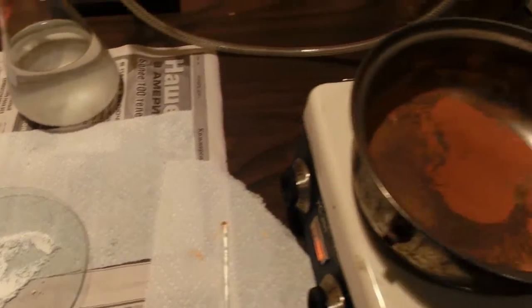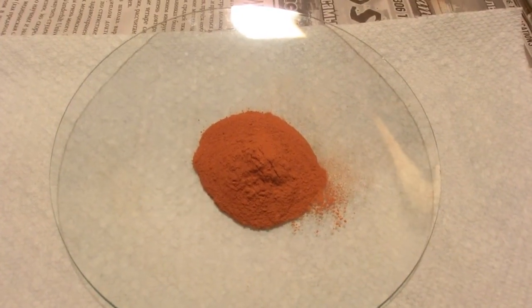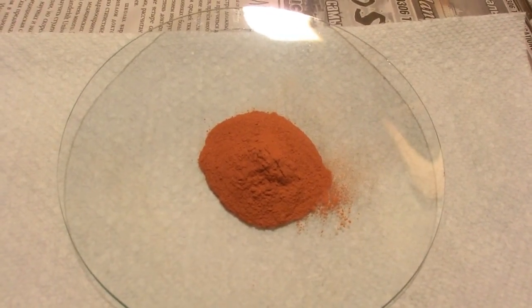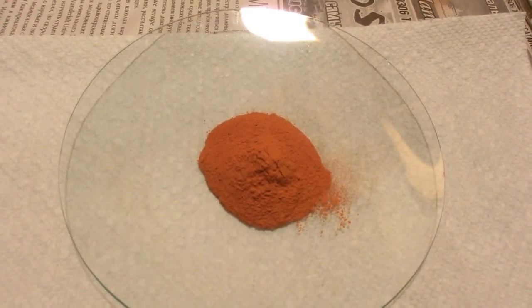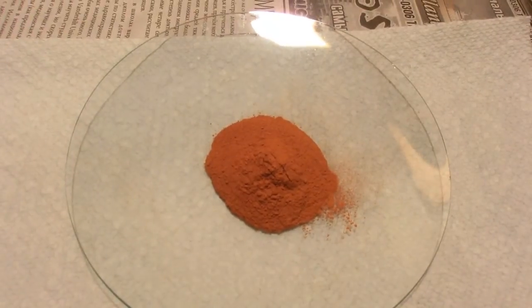Here's our final product: 10.8 grams of lead tetraoxide. This can be used for making crackling microstars or dragon eggs.